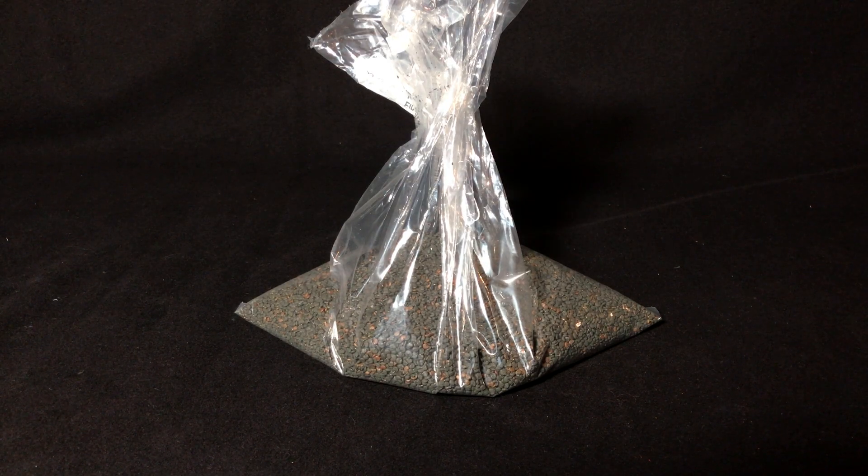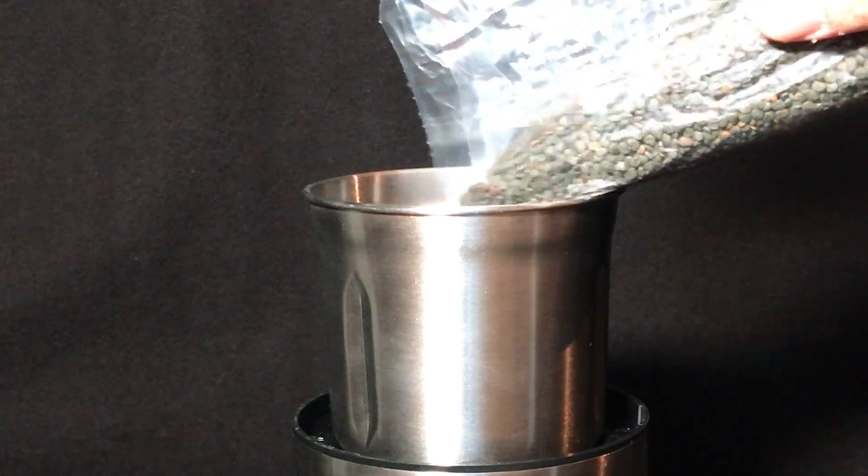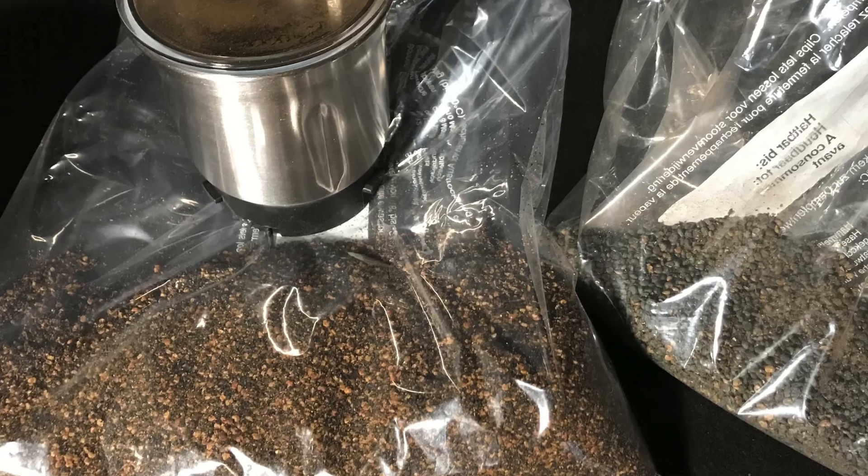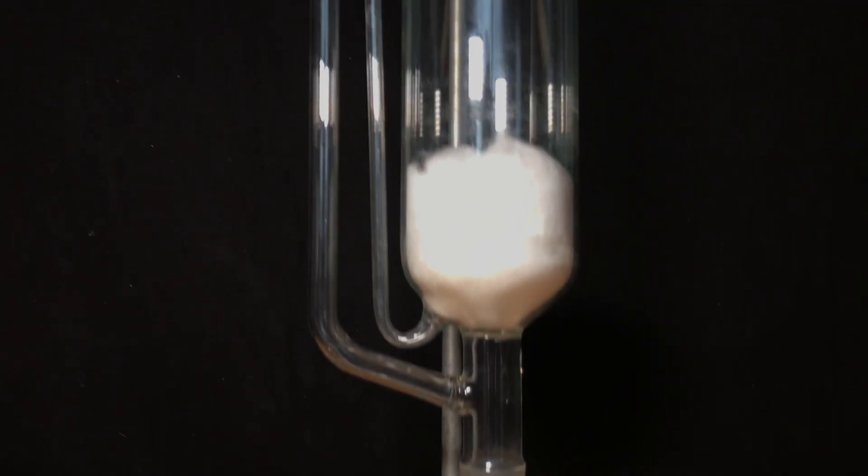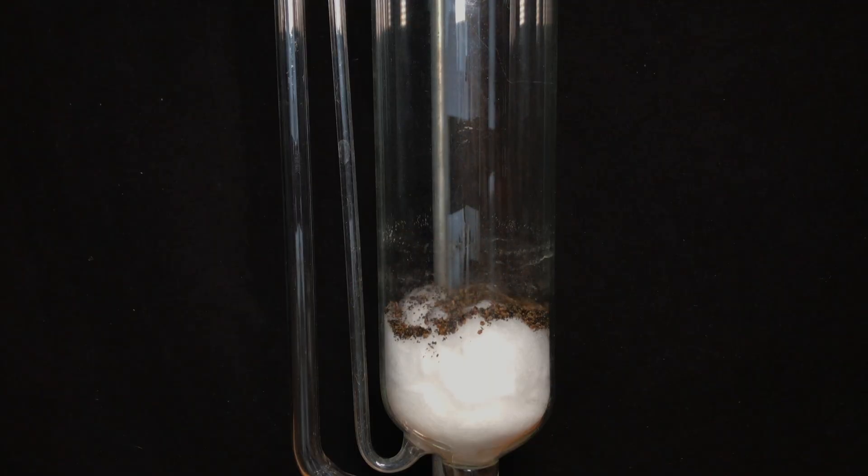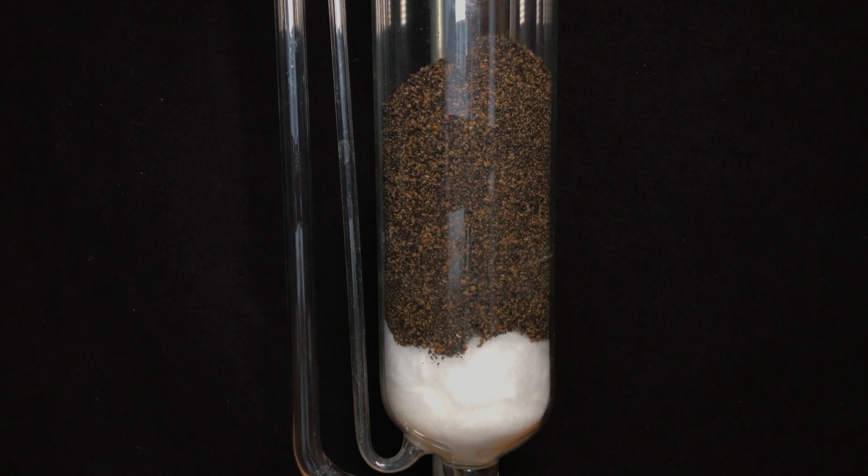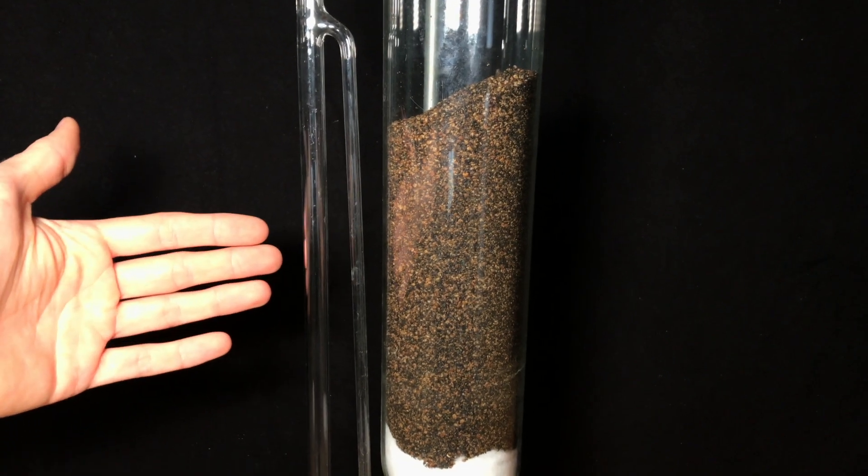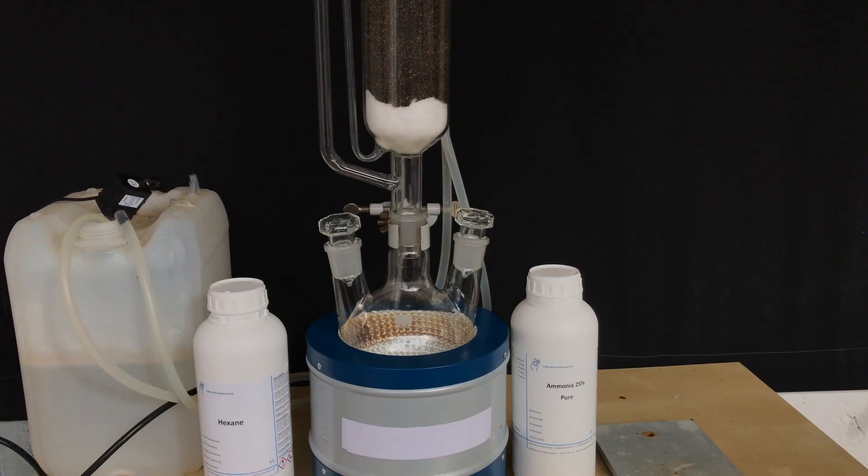The most important ingredient in this extraction are of course the Datura stramonium seeds. They were ground up to increase the surface area and then put into this big extractor. It is not a Soxhlet extractor because it has no siphoning cycles, but it is an extractor and it works. If you know what these are called let me know down in the comments.